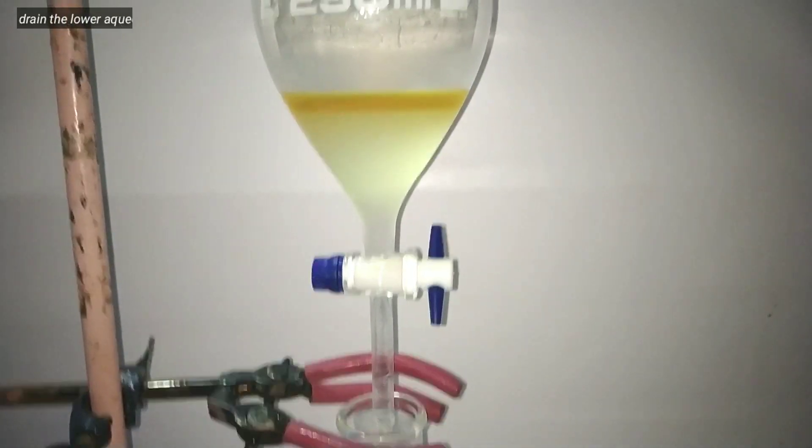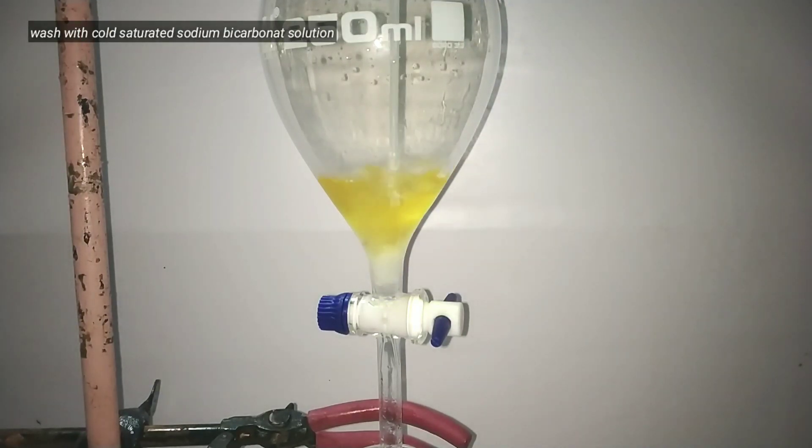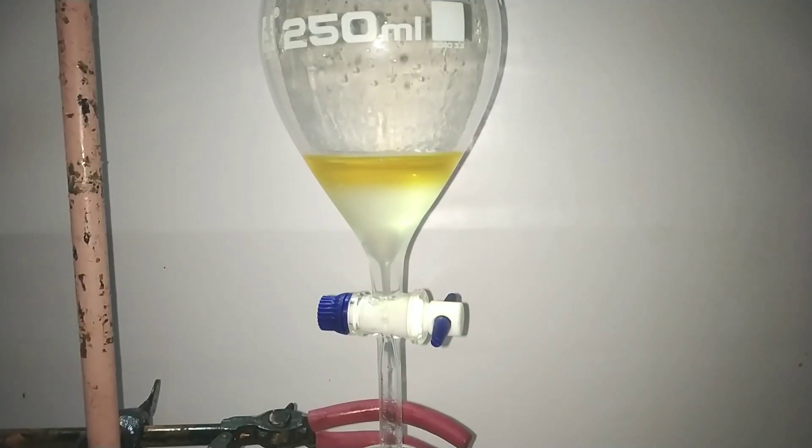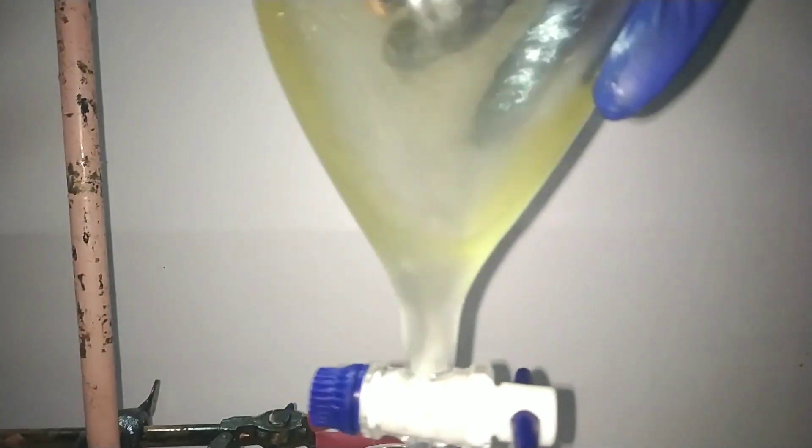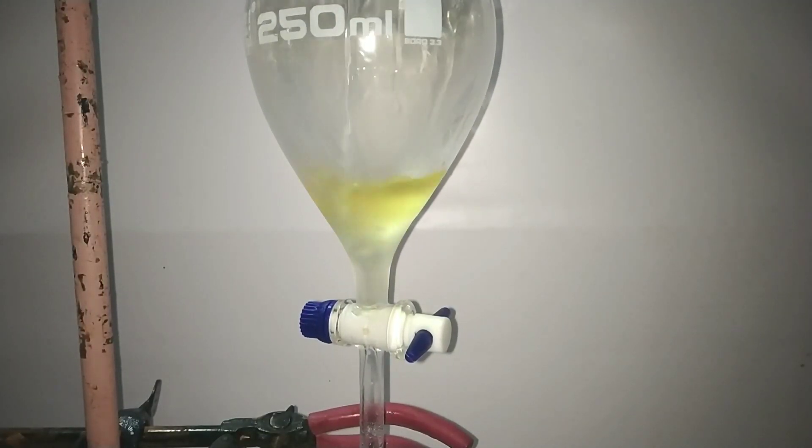After the complete reaction, we transfer the contents to a separatory funnel and separate the upper isopropyl nitrite layer. Now wash the crude isopropyl nitrite with some saturated sodium bicarbonate solution. I did two to three washings and after each addition the separatory funnel was capped, shaken, and vented to remove the excess acid.